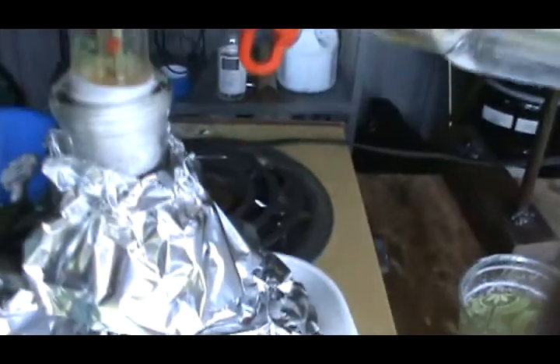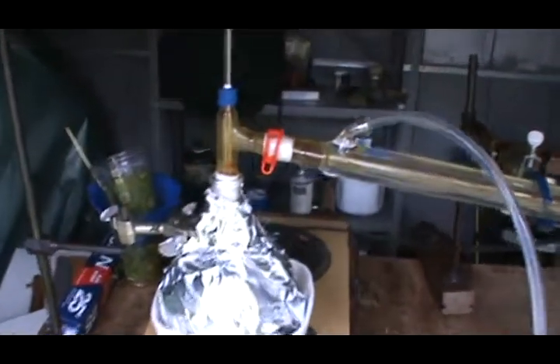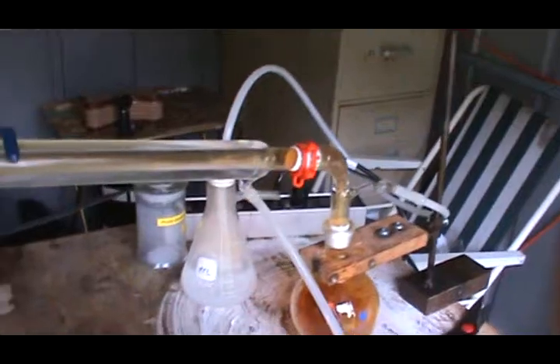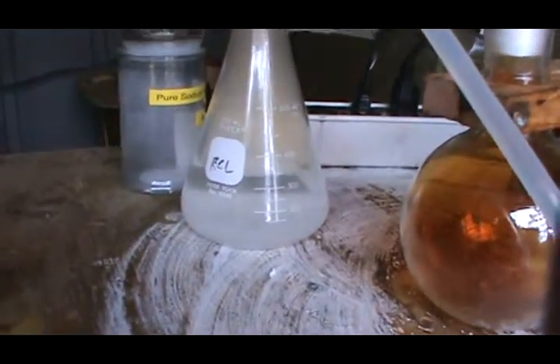The temperature is probably around 40 degrees right now so I gotta wait a bit. Now that we're almost up to temperature you can start to see the NO2 fumes building up but they're getting neutralized in my bottle of lye. You can see them bubbling in there.